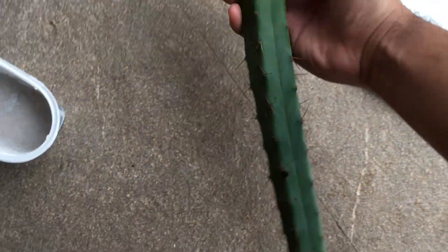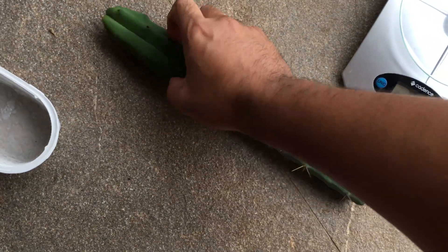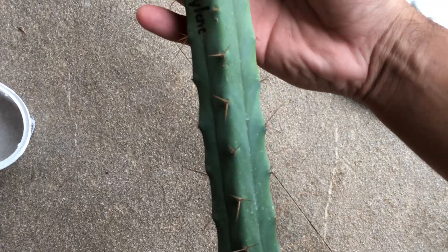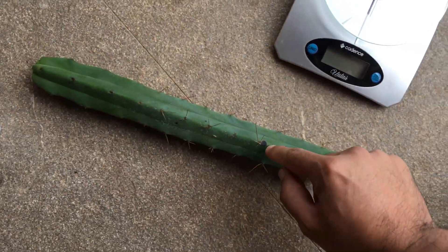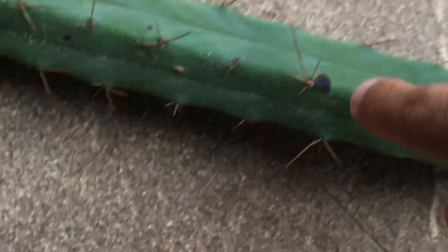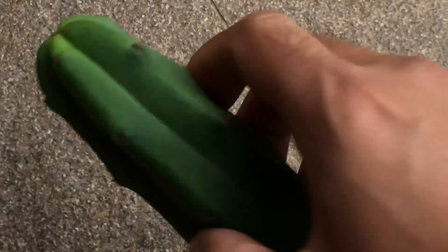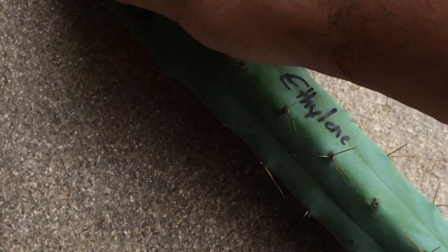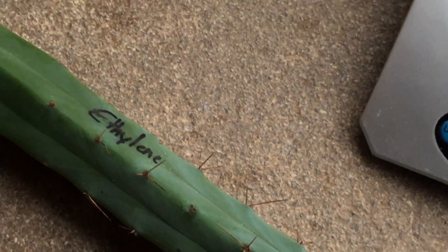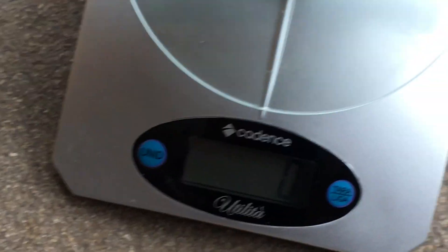Visually, there's a small amount of weeping black rot, or just black. I'm not sure what to describe this as, but it looks similar to weeping black rot, or just a wounding with some black. It's fairly firm to the touch and not exactly different from the starting condition.